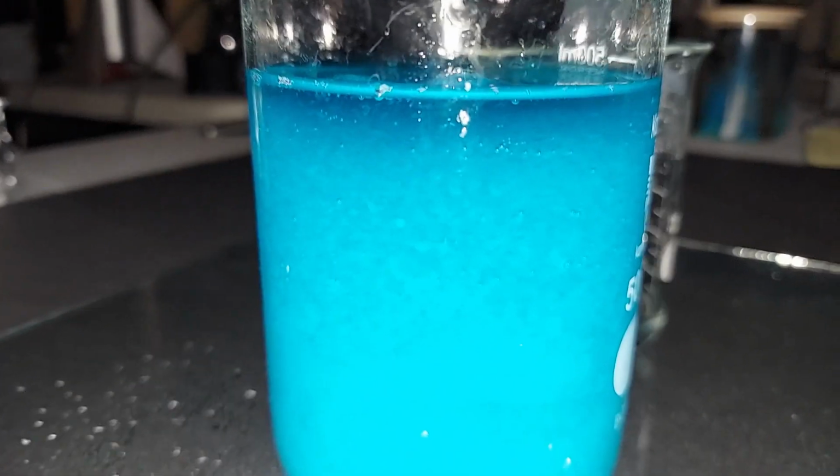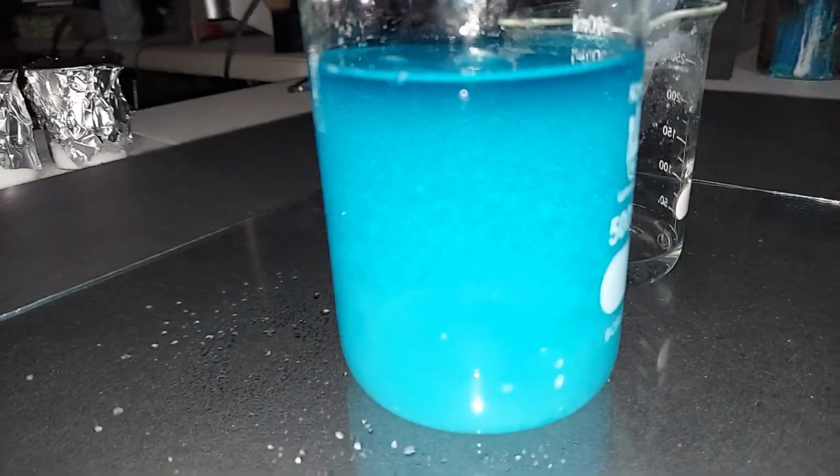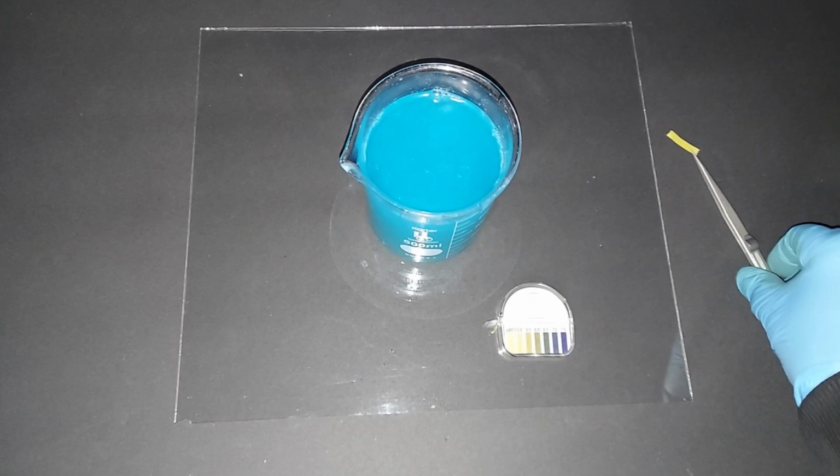And you can see the precipitate that's formed in there rather quickly. It went from a clear blue to this kind of duller blue-green color. And I think we're done titrating. I'm going to mix this good, and then I'll start filtering it. Here's our solution of the copper carbonate.